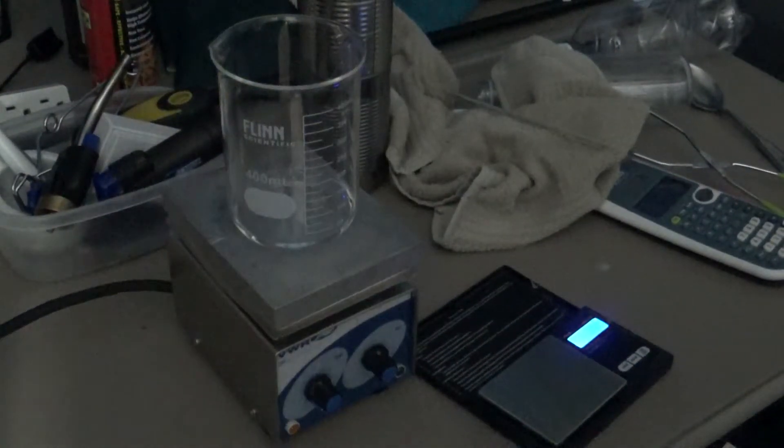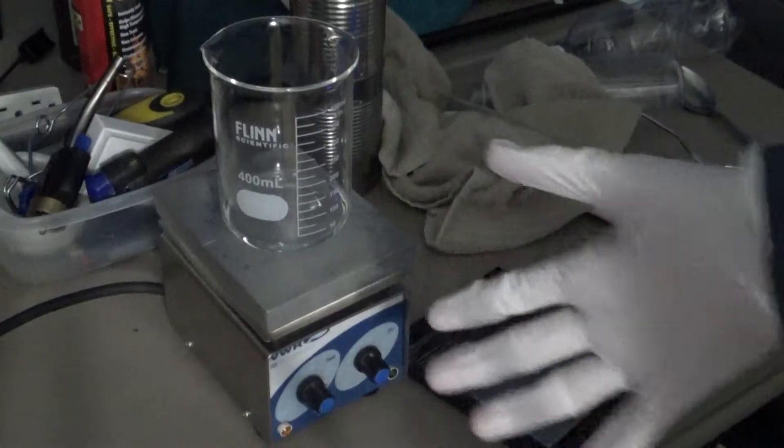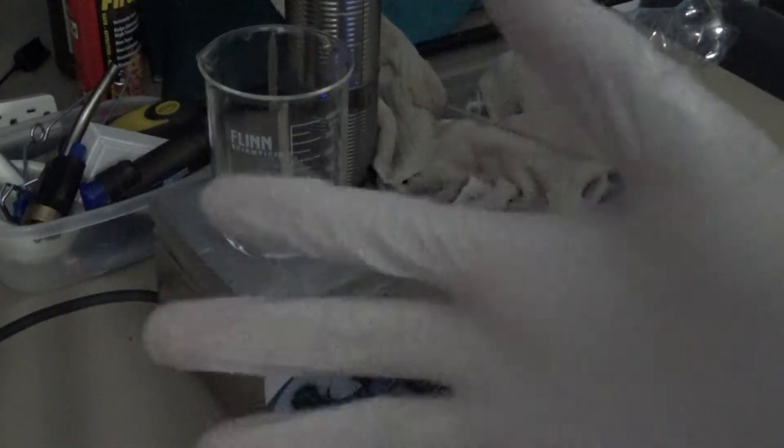Okay, I'm now going to take a density sample. I won't need too much because density is going to be the same, right? Notice I'm wearing gloves. Please take all necessary safety precautions.